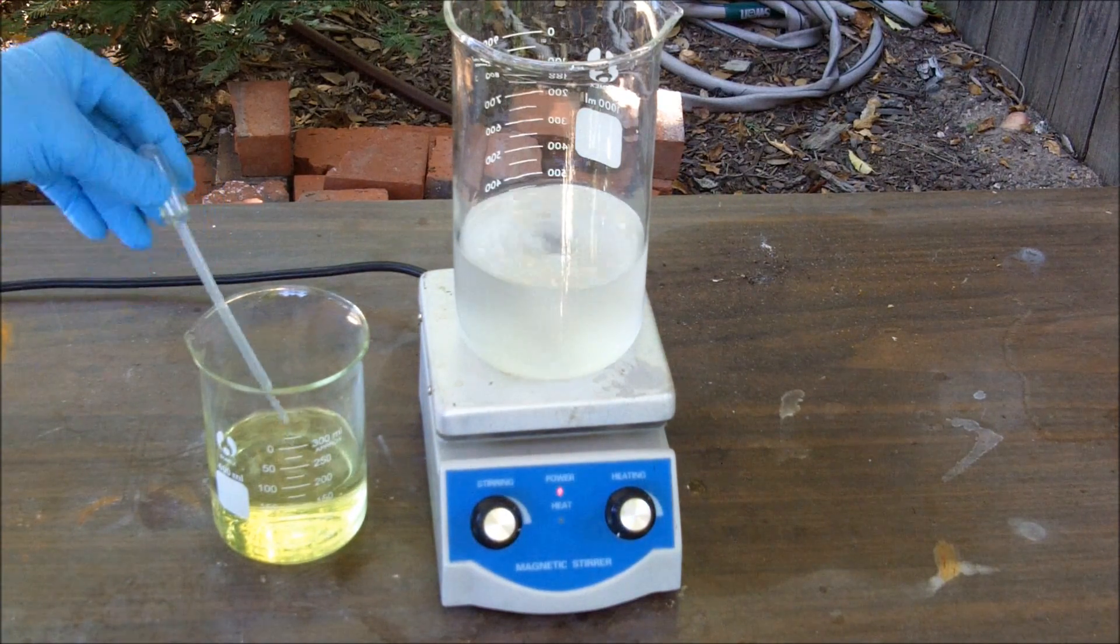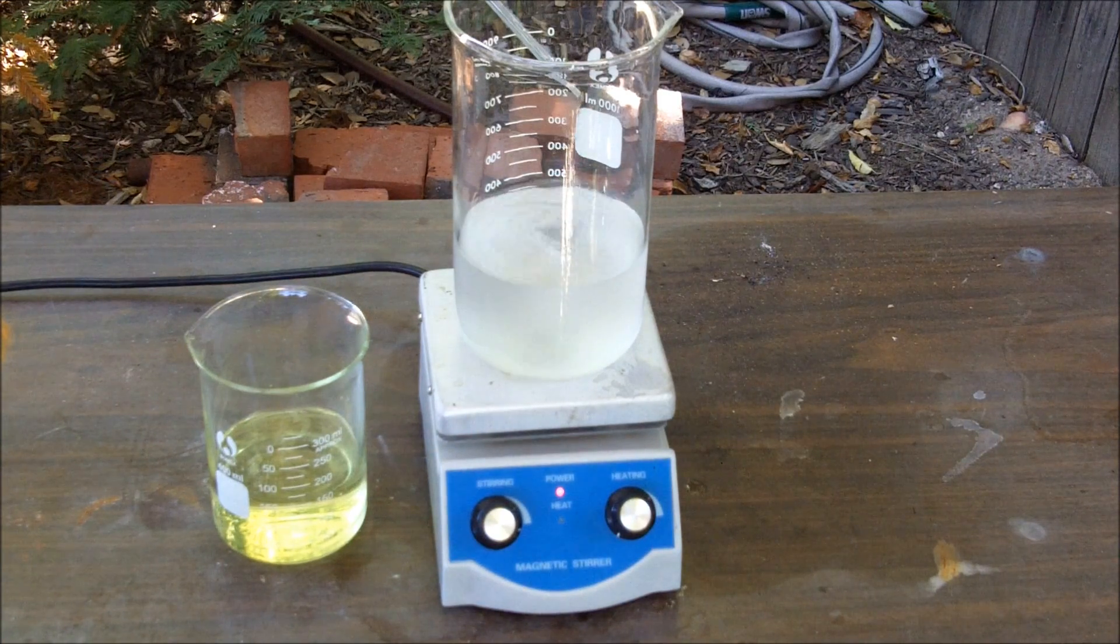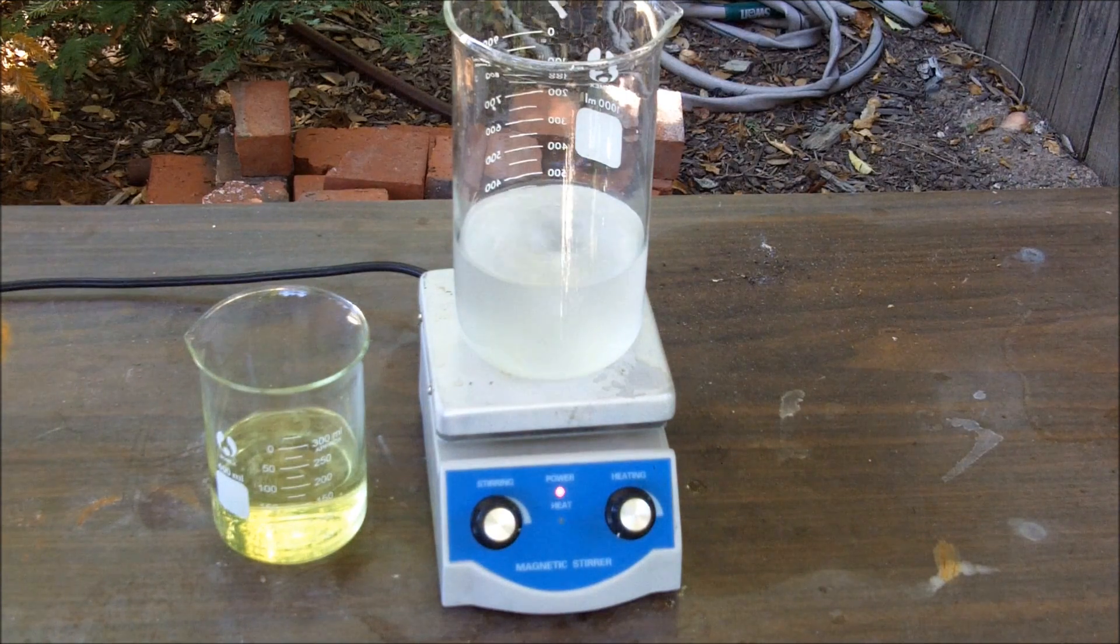So anyway, I am going to take up some bleach and add that. Okay, we can see some bubbles forming.